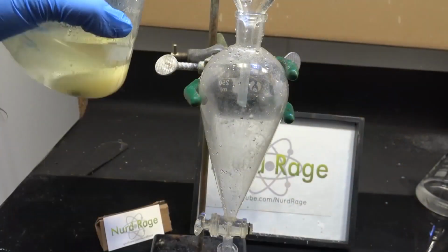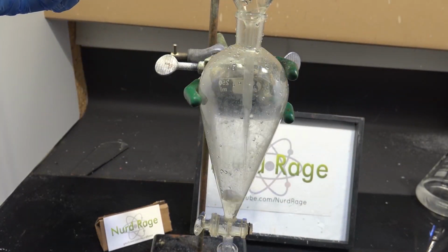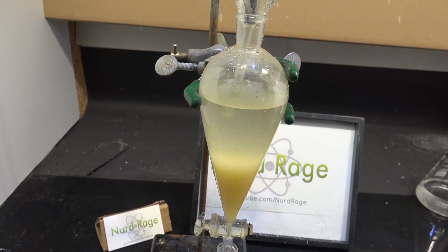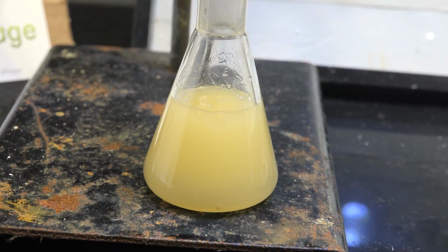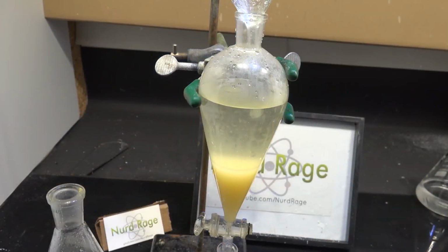Okay, now using a separatory funnel, recover the lower organic phase and discard the upper aqueous phase. p-Chlorophenyl acetonitrile is denser than water, so that's why the phase sinks rather than floats, as in most organic extractions. And there is our crude p-chlorophenyl acetonitrile. For better purity, I recommend you wash the organic phase again with 100 milliliters of distilled water.